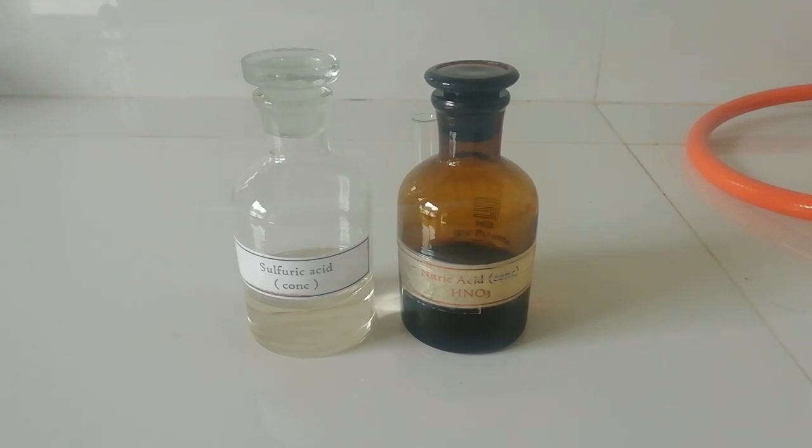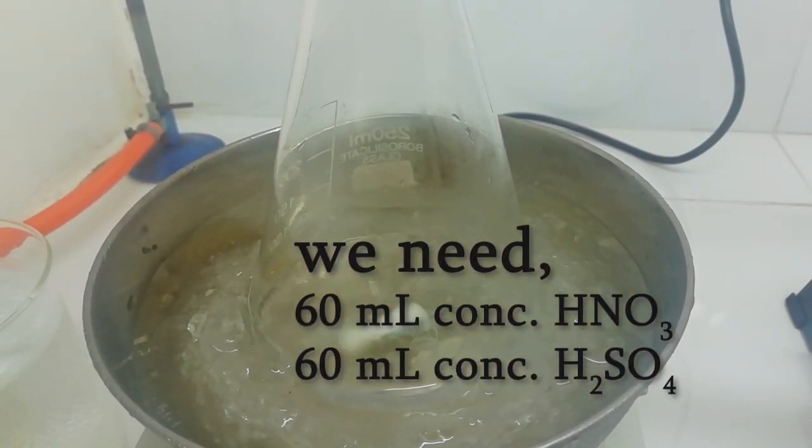For this reaction we need concentrated sulfuric acid and nitric acid. First we need to cool down these acids, and let's see what I am going to do next.